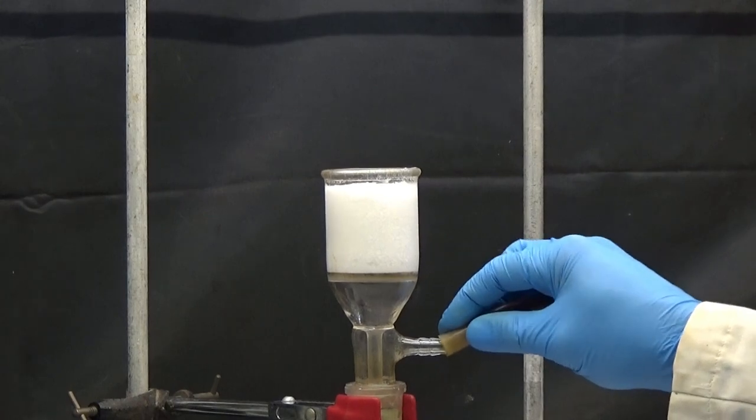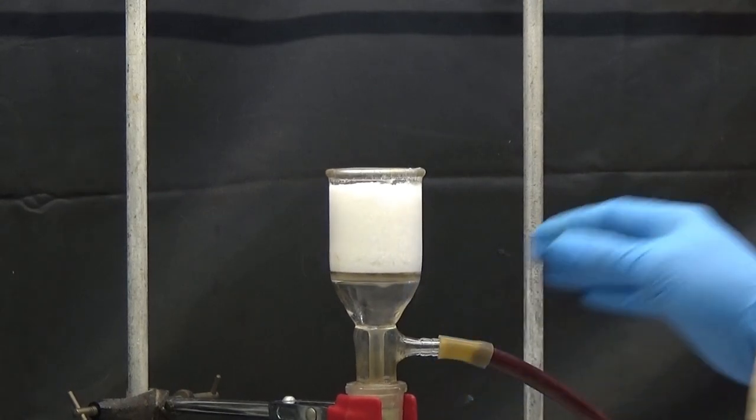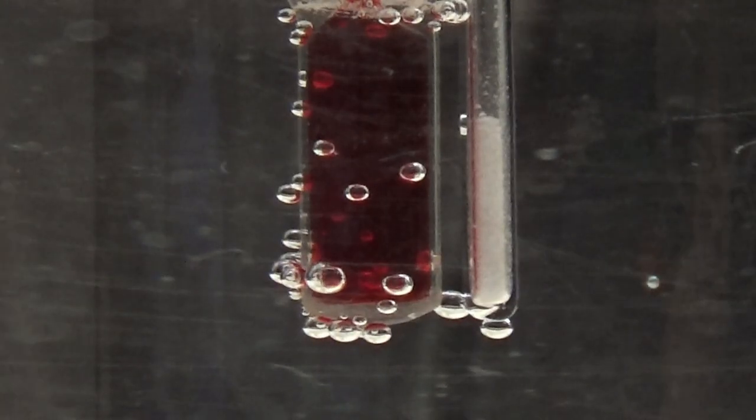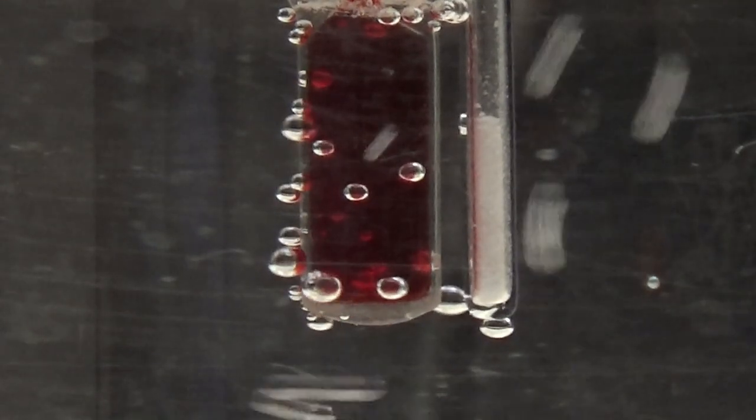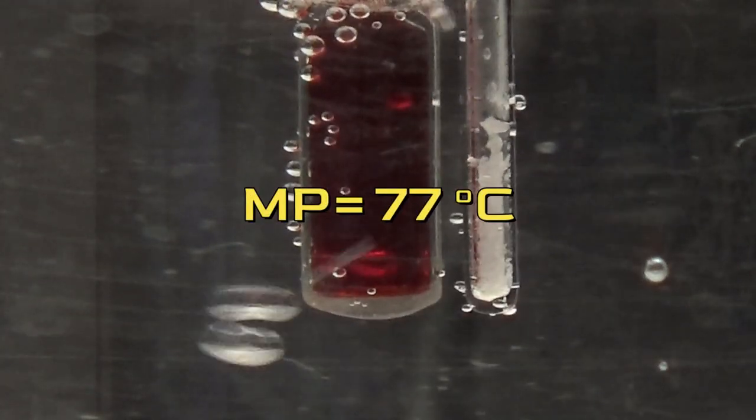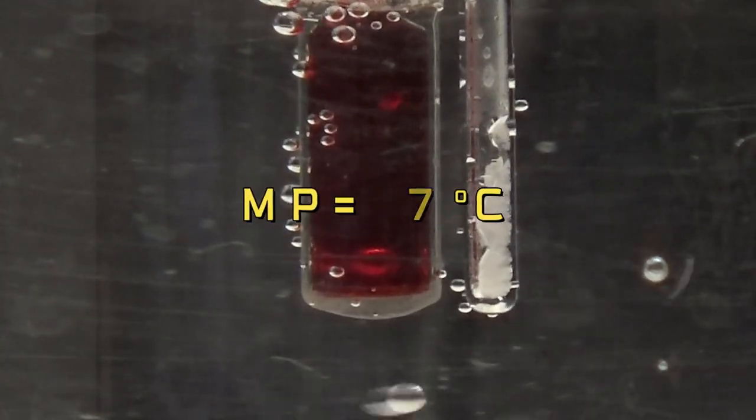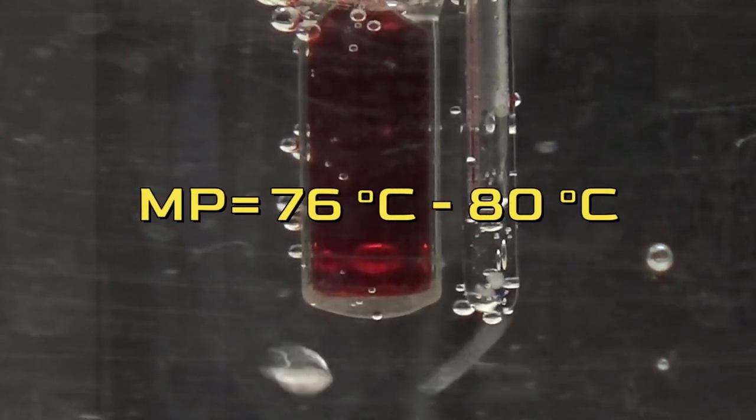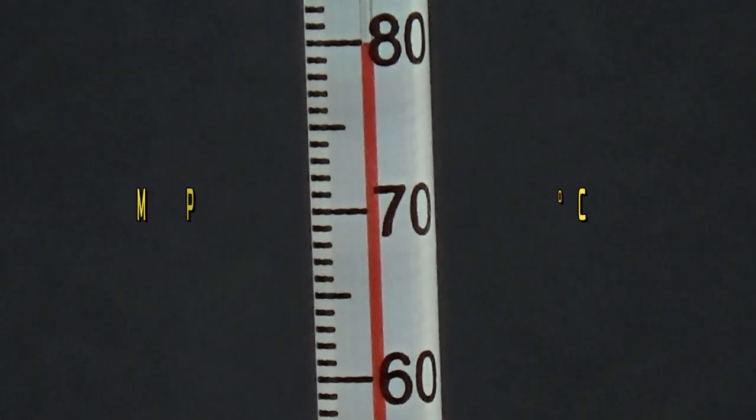Dry in a desiccator for 24 hours. When dry, the melting point is determined. The theoretical melting point of phenylacetic acid is 77 degrees. In our test, a melting point between 76 and 80 degrees was obtained.